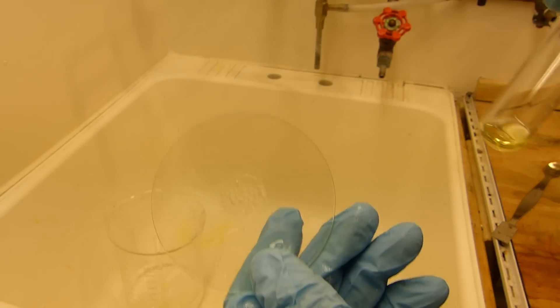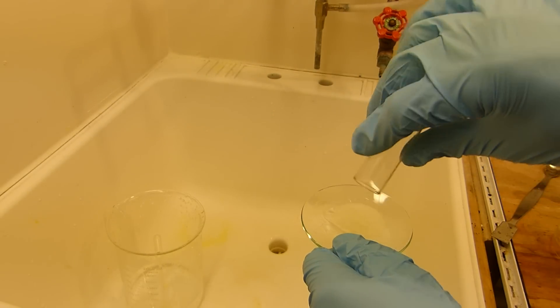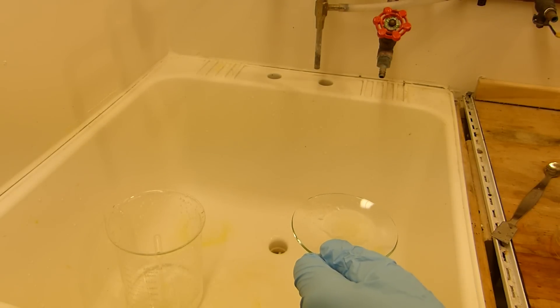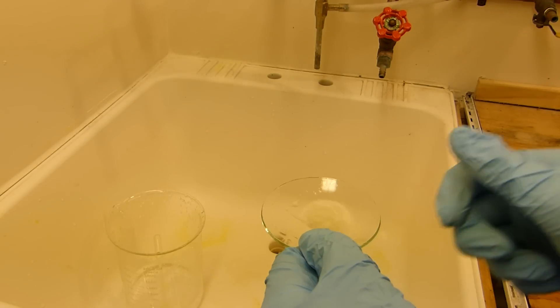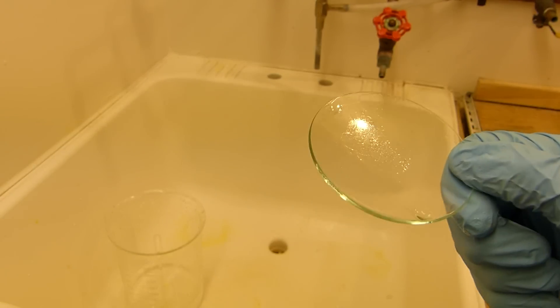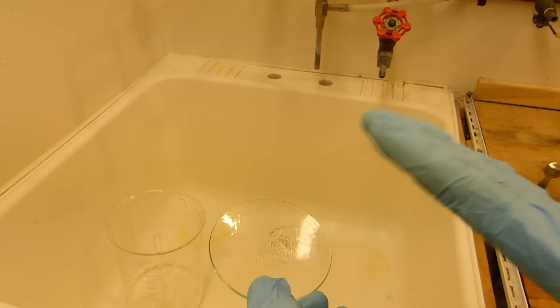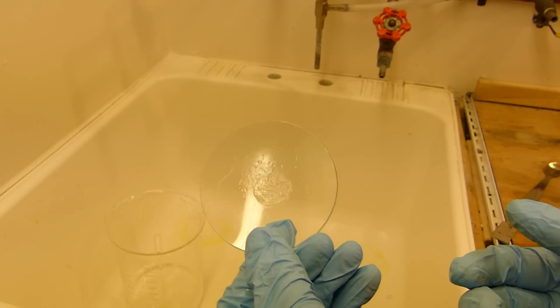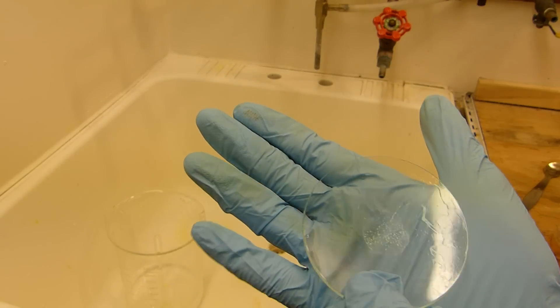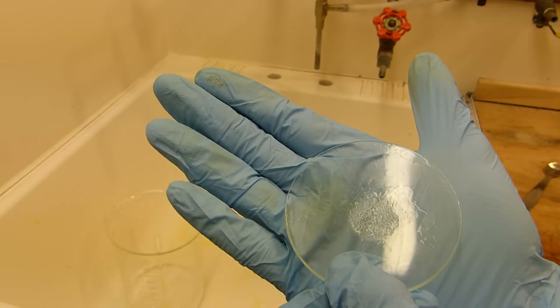But what about isopropyl nitrite? So I've got a test tube with a little bit of isopropyl nitrite in it. And of course the slide contaminated with the grease here. And we'll just pour this on. Pour it back off. And you can see we're starting to degrade that grease. See how it's spread out now and the peaks aren't quite as high? And in fact, if you were to keep going, I really don't want to rub it with my gloves because I'm not sure if it's going to go through them or not. But you will actually get rid of all your joint grease using isopropyl nitrite. There are better solvents to use for this, but now you can really see. It's sort of run all over the place.